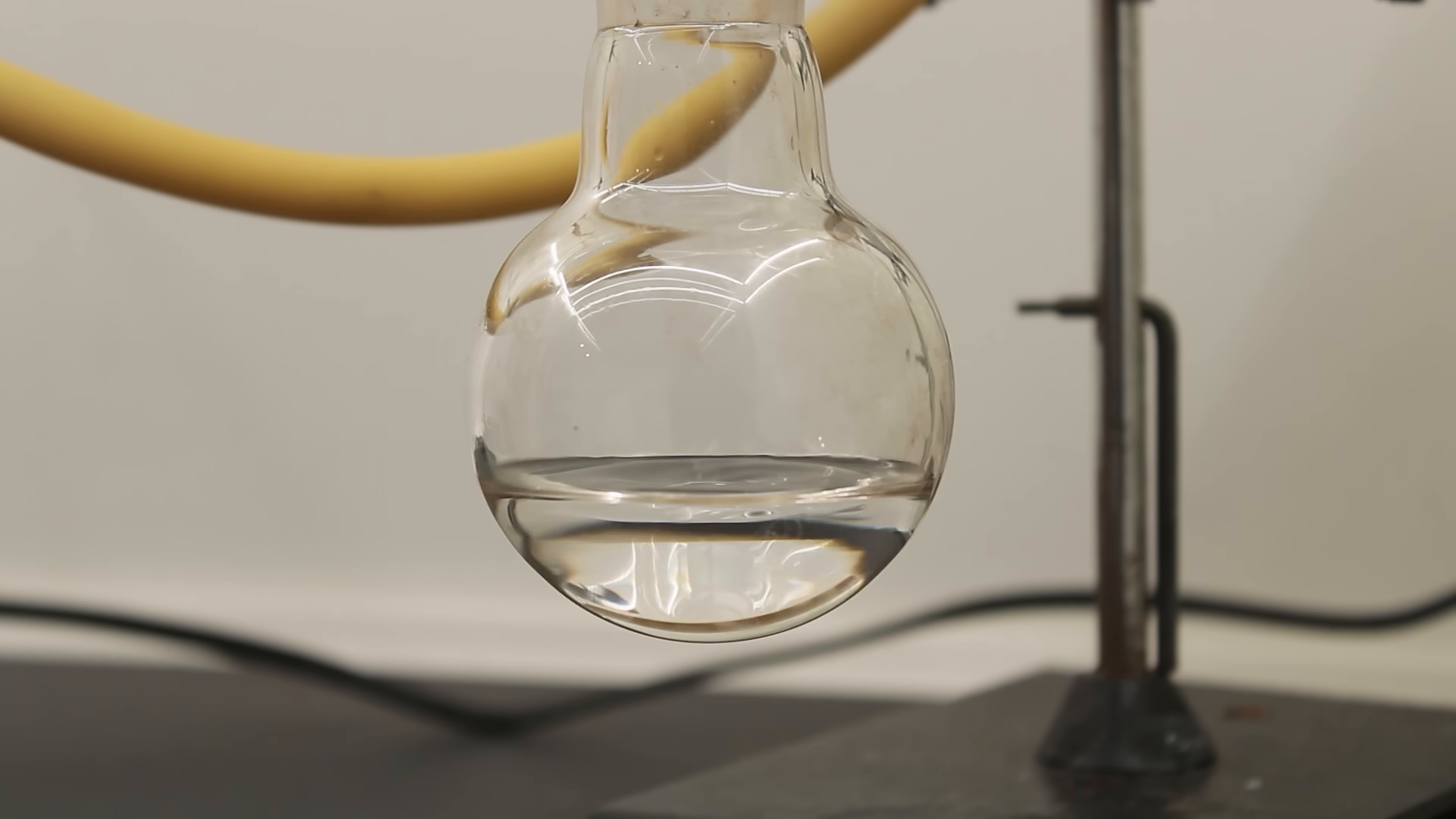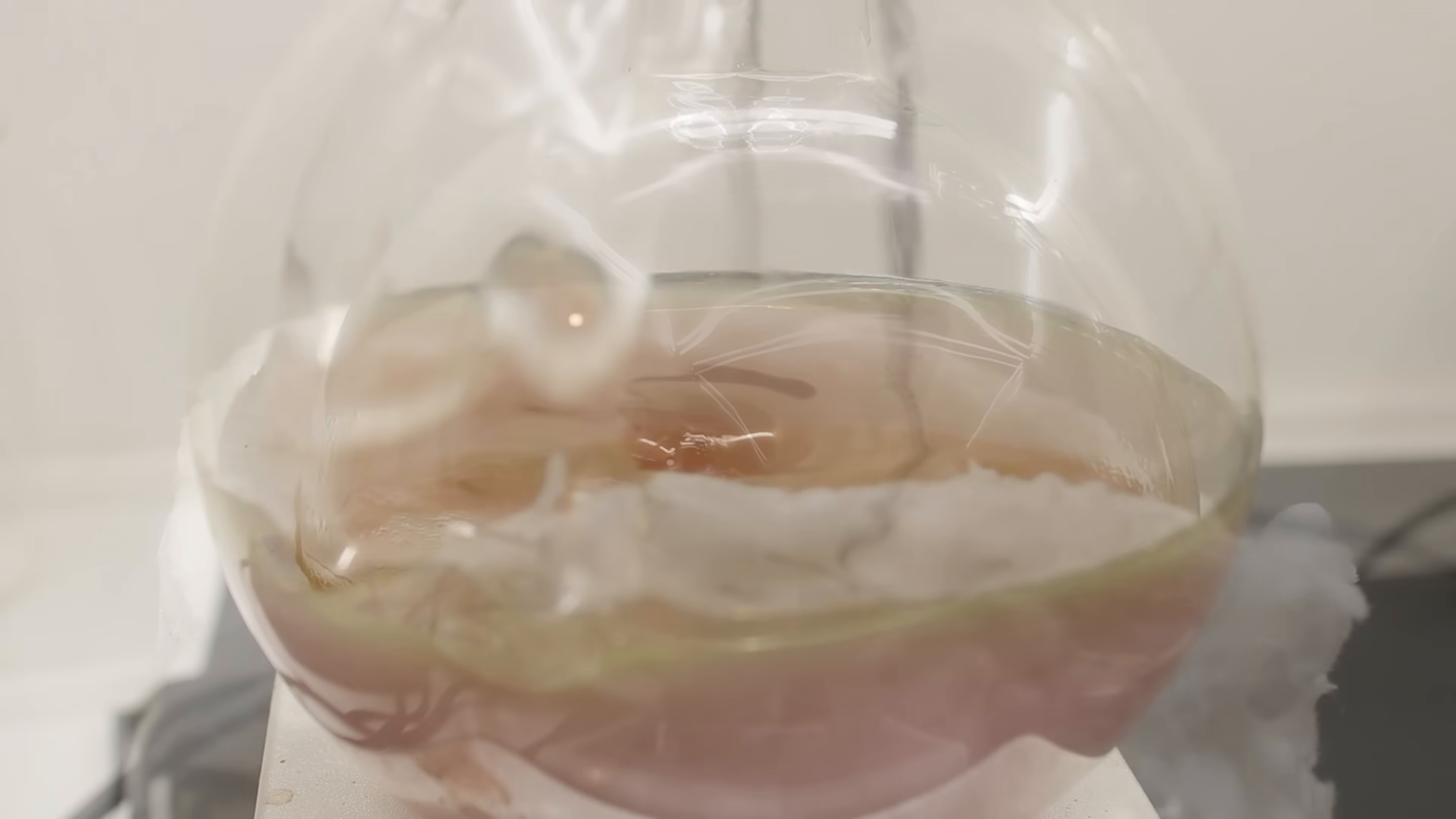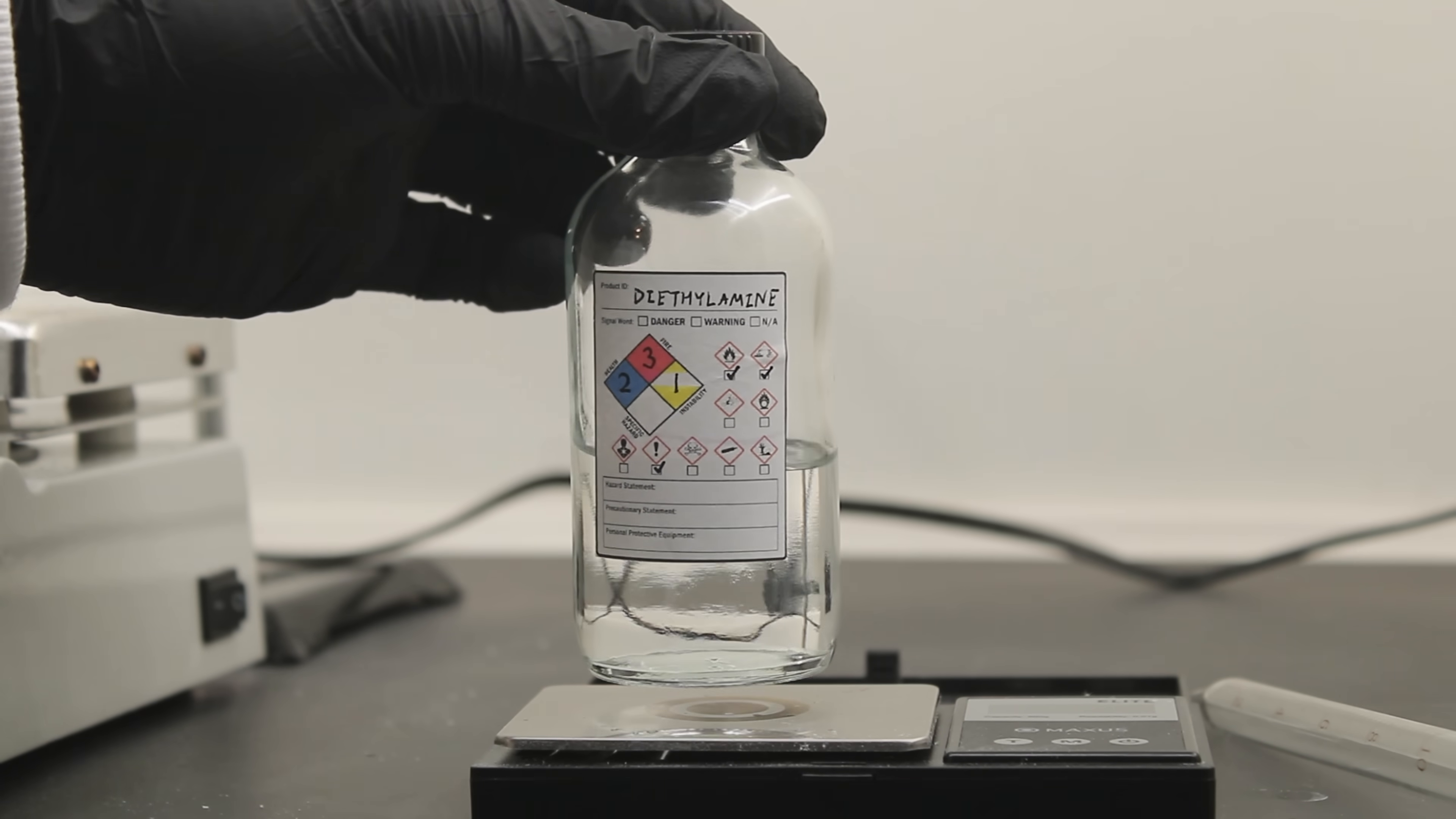The diethylamine was made in a previous video, and it's actually the ingredient that ties bug spray into this whole mess. If you want to know the exact process, I posted the links below, but essentially, I just distilled a solution of DEET and sodium hydroxide in ethylene glycol. It was ridiculously easy and super high yielding.